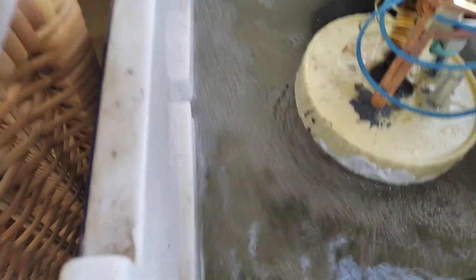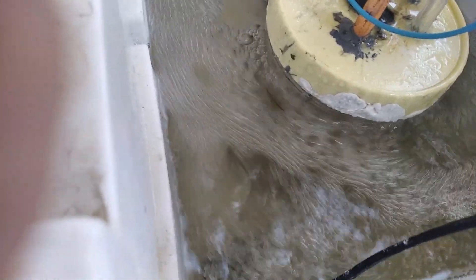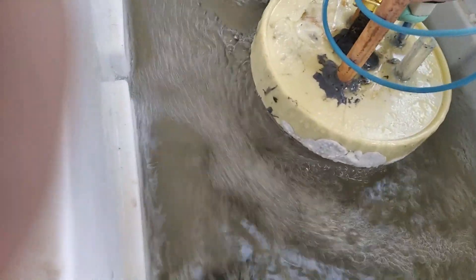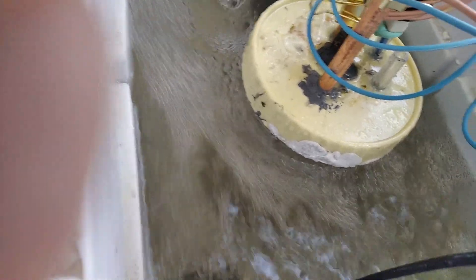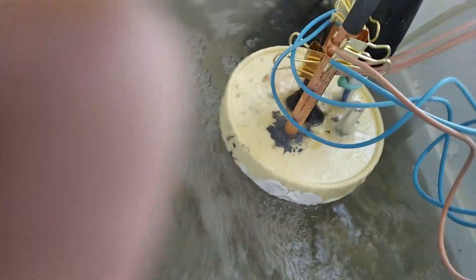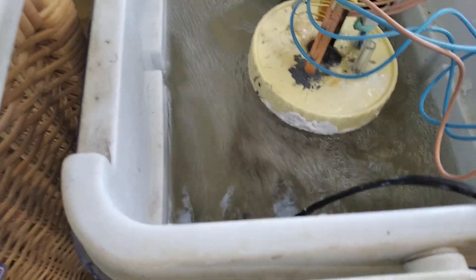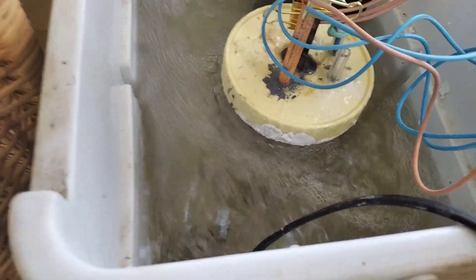One thing to note: if I cut the Venturi, you can see the cell actually looks clear — which means there's no corrosion happening on the electrodes. This is the first time I've ever seen the cell run clear. I've used a new plating process at an elevated temperature. The bath consists of lead perchlorate, which only needs lead metal immersed to regenerate it, and uses an aquarium heater to keep the temperature at 40 degrees. By partially submerging the aquarium heater, it will not be able to read the temperature correctly, which means it will run hotter.